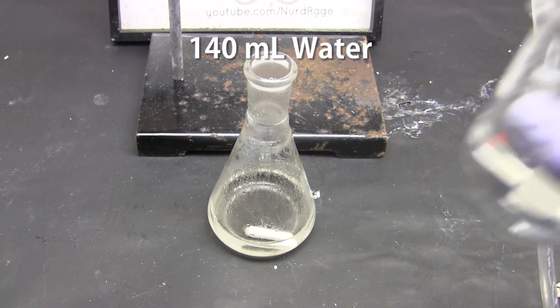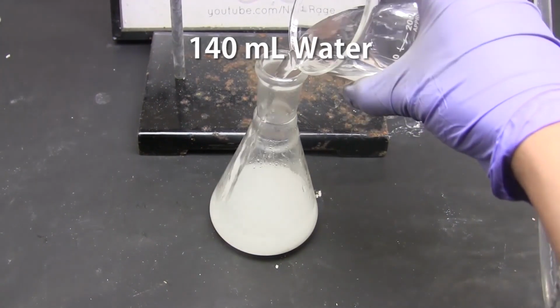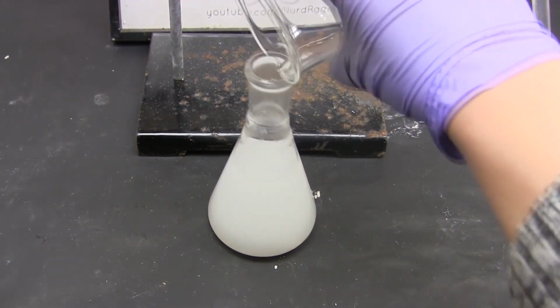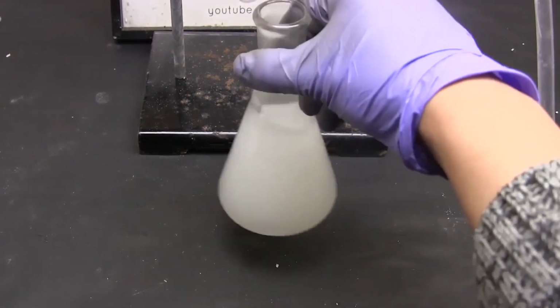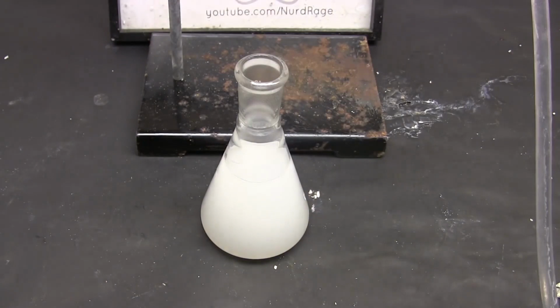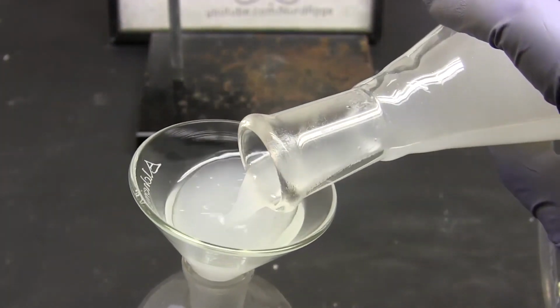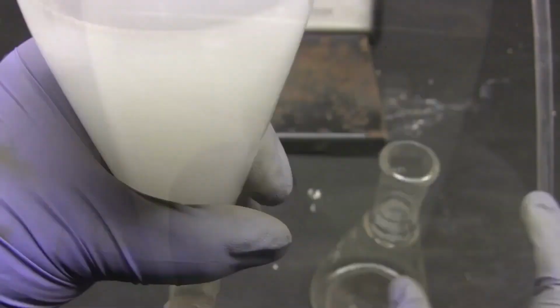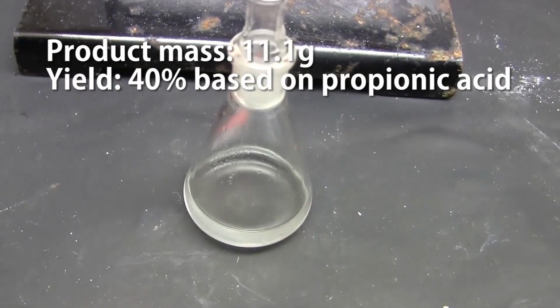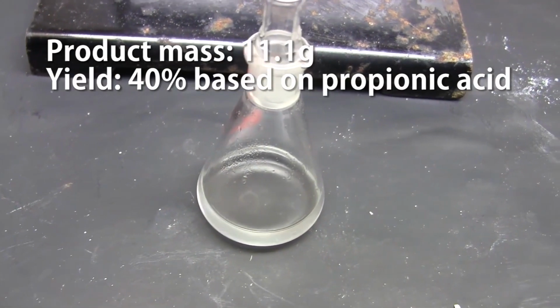Now we add 140 milliliters of cold water. The propionic acid, sulfuric acid, and ethanol are all very soluble in water, but the ethyl propionate has very low solubility and conveniently has a lower density than water, so it floats on the aqueous layer like an oil. We can then use a separatory funnel to separate just the ethyl propionate layer. And here it is, our sample of ethyl propionate. The mass is about 11.1 grams, so my raw yield was about 40%.